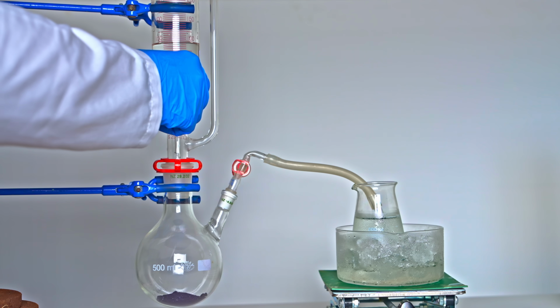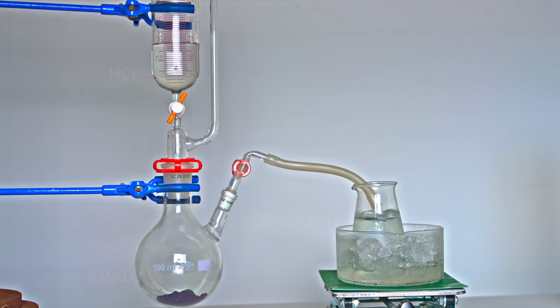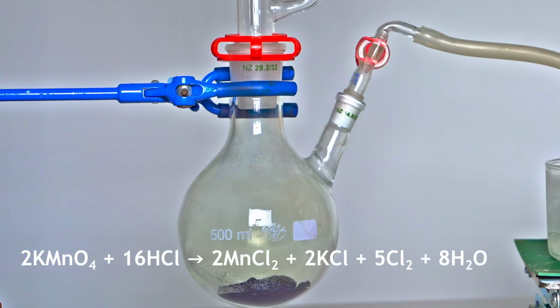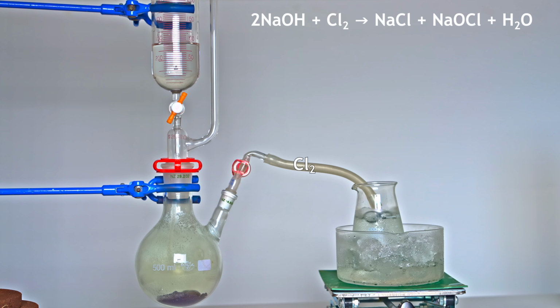First, we need to prepare a solution of sodium hypochlorite. To do this, I'll use the classic reaction between potassium permanganate and hydrochloric acid to generate chlorine gas. I'll bubble it directly through a sodium hydroxide solution, which will react with the chlorine to form the sodium hypochlorite we need in this beaker.